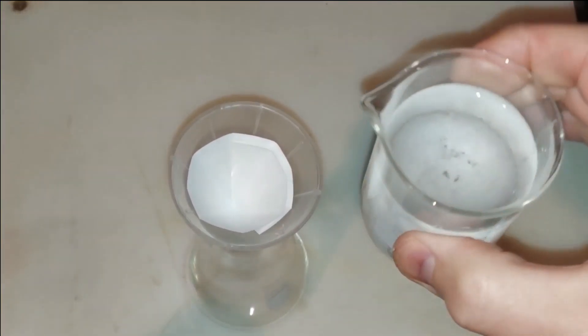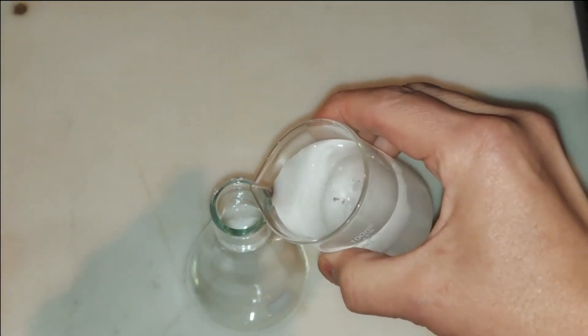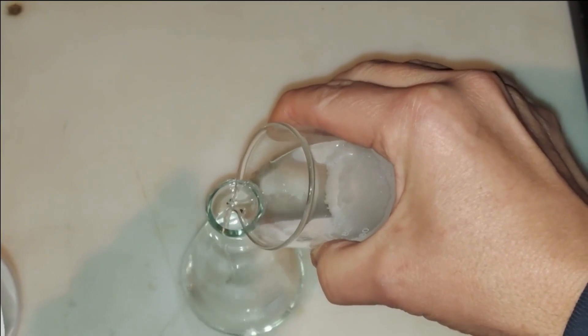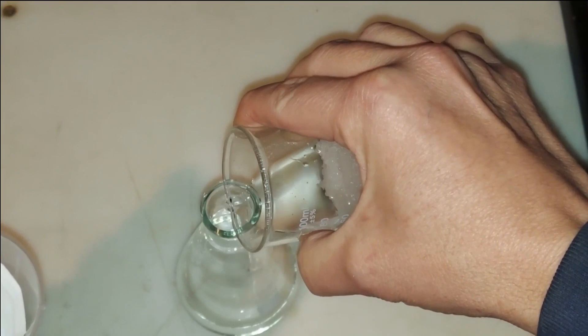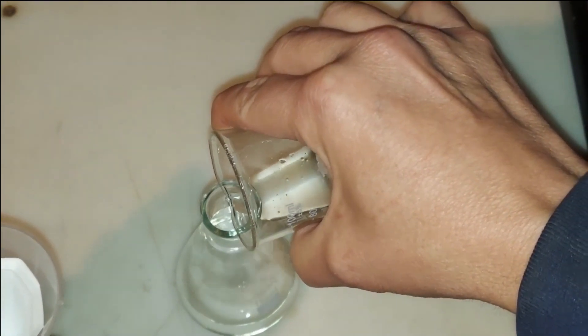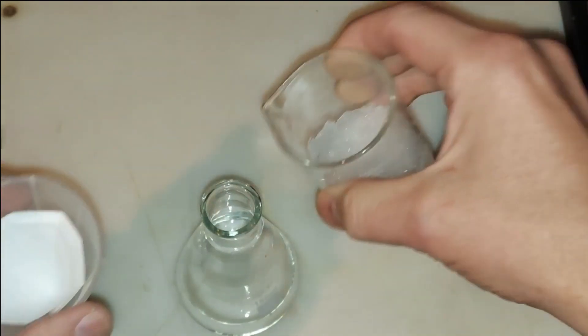All right, we're going to pour off some of the solution here. There's a few crystals in there, but compared to the time it'll take to filter, I'm not going to worry about it.